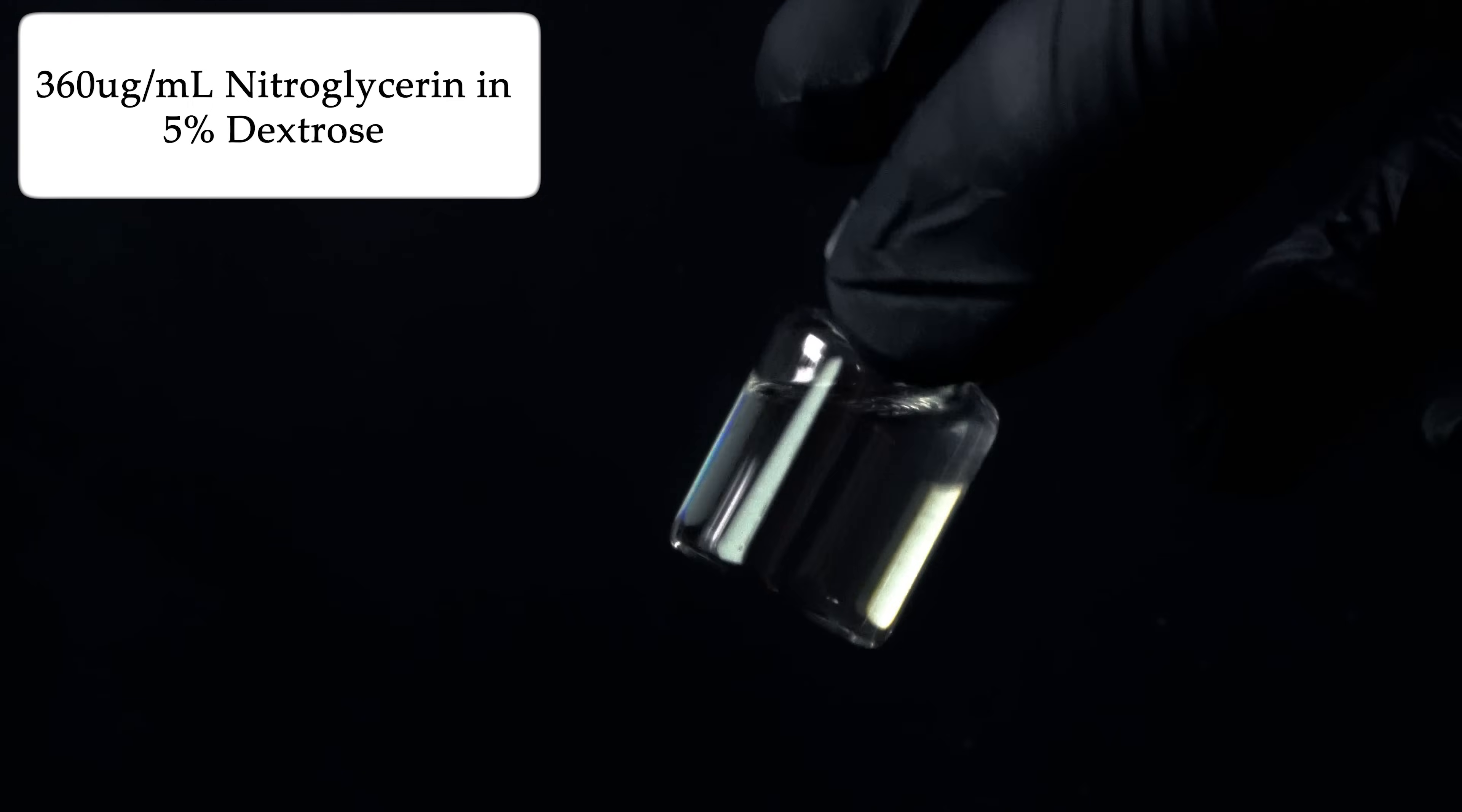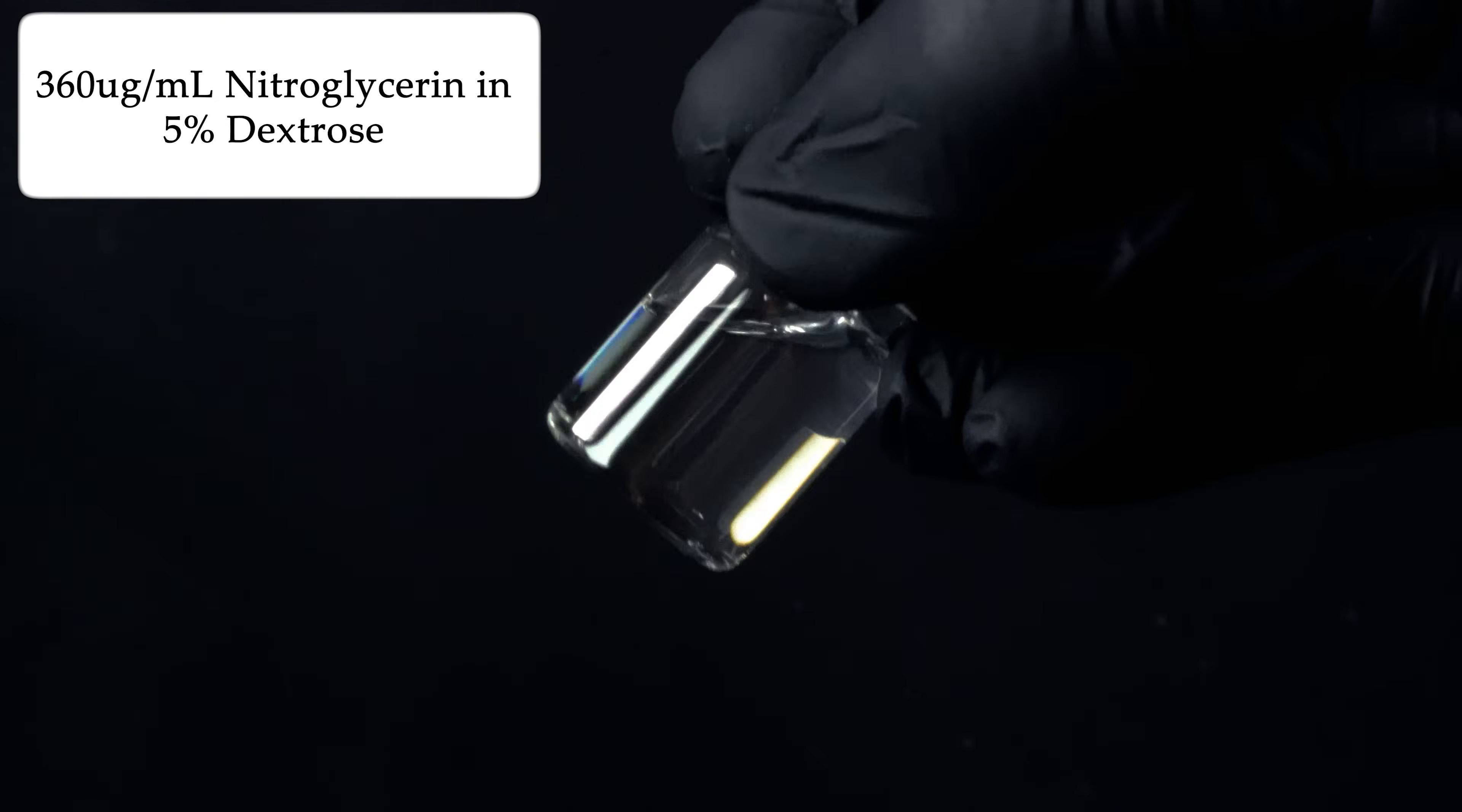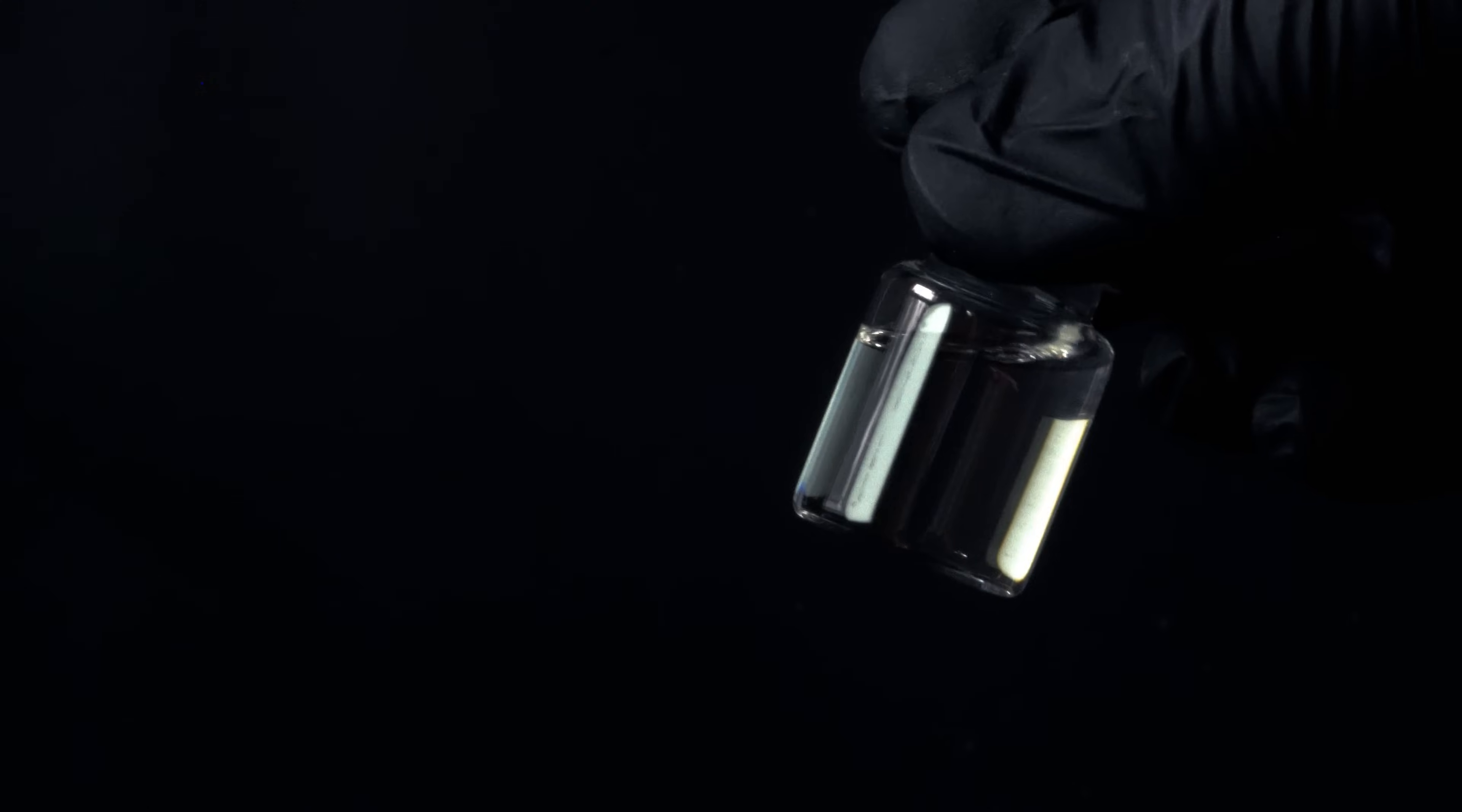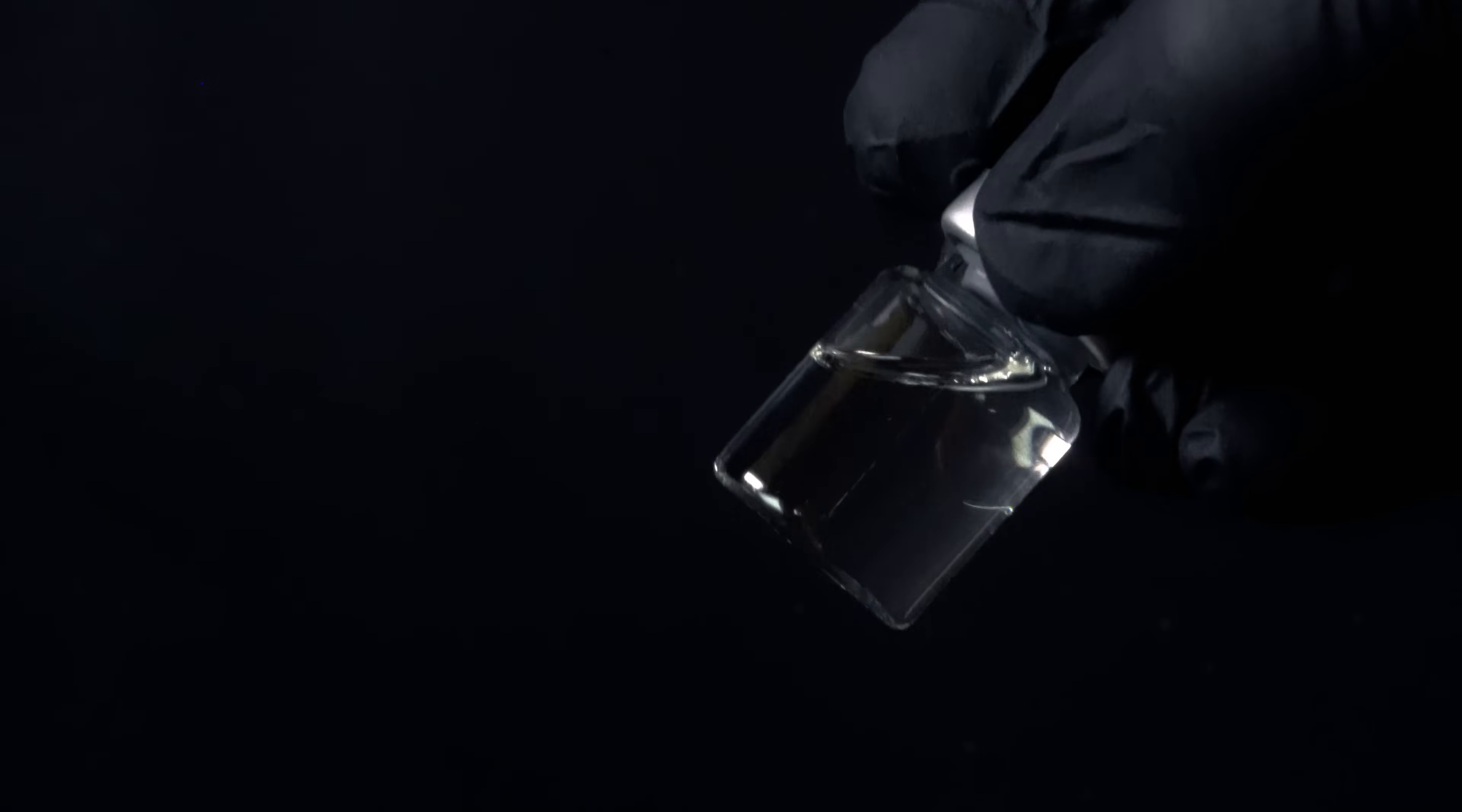Now this is used in hospitals and it's generally in that 5% dextrose solution, so I would say this is a success. The only thing that I think I could add would probably be citric acid, which can be used as a stabilizer for the nitroglycerin. Now this may seem kind of boring just to make a medication. I think we need to test out nitroglycerin's properties and showcase some of them.